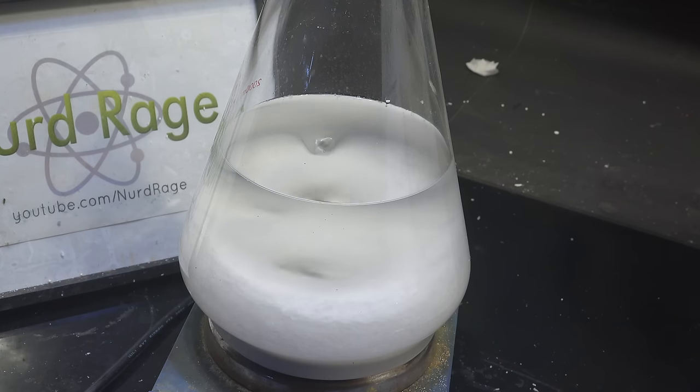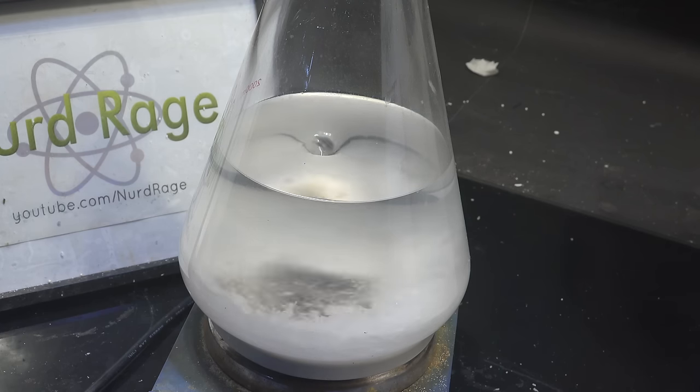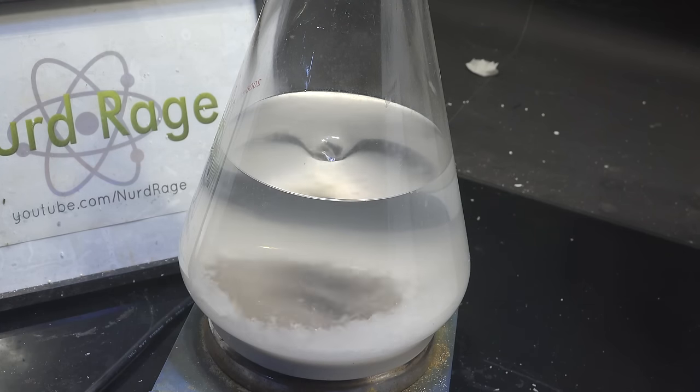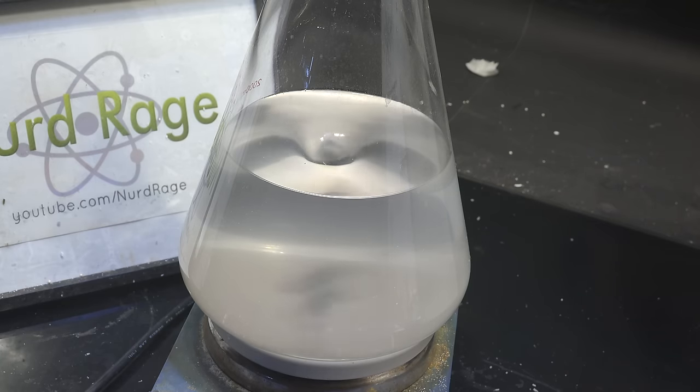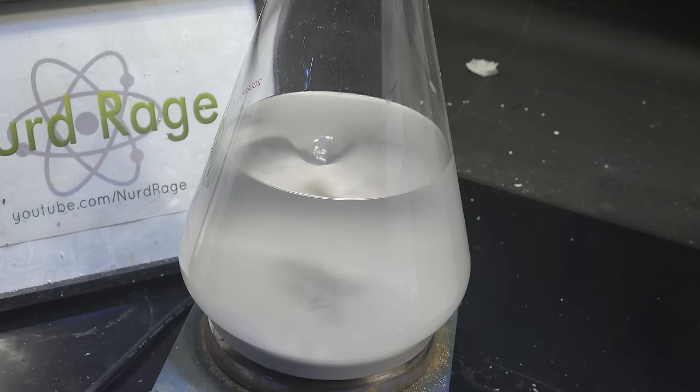Now simply heat it up until it completely dissolves. This dissolving has the added effect of releasing any entrapped impurities like potassium chloride. So when we recrystallize we'll have a somewhat purer product. Okay everything is dissolved. Now we turn off the heating and let it cool.